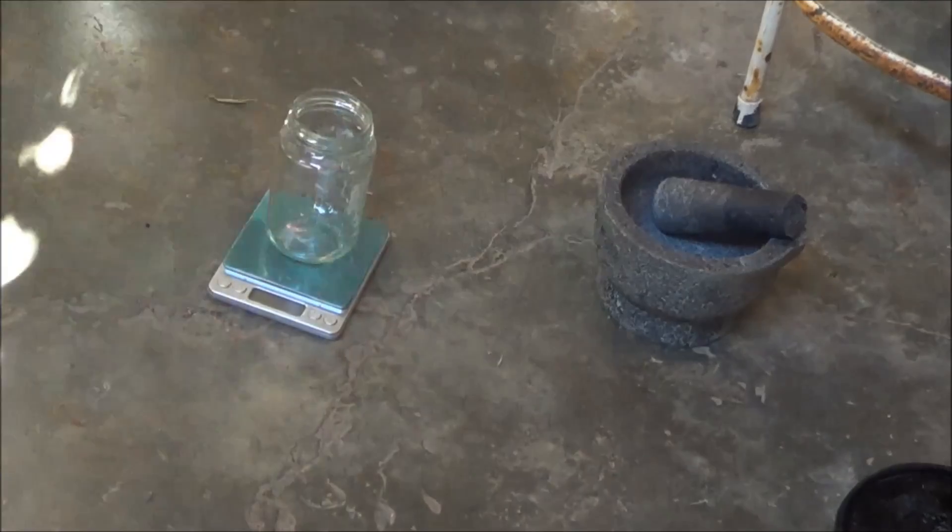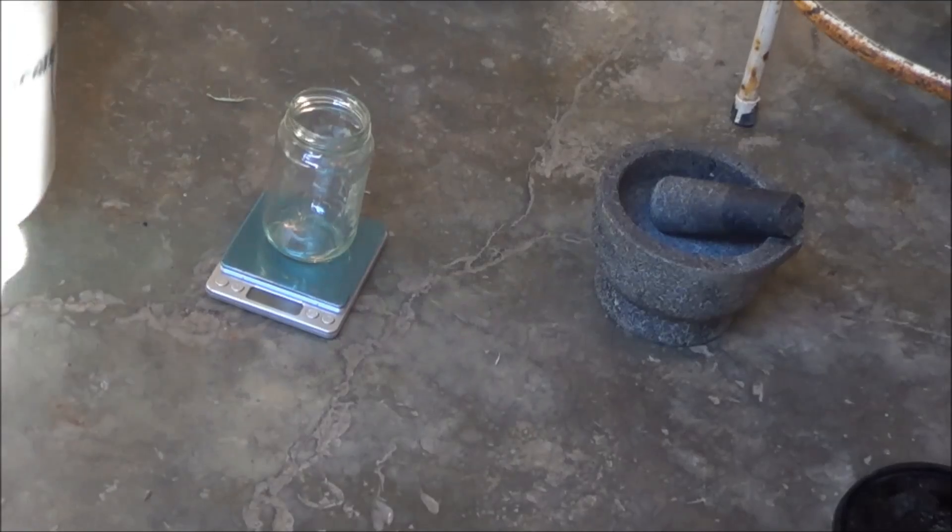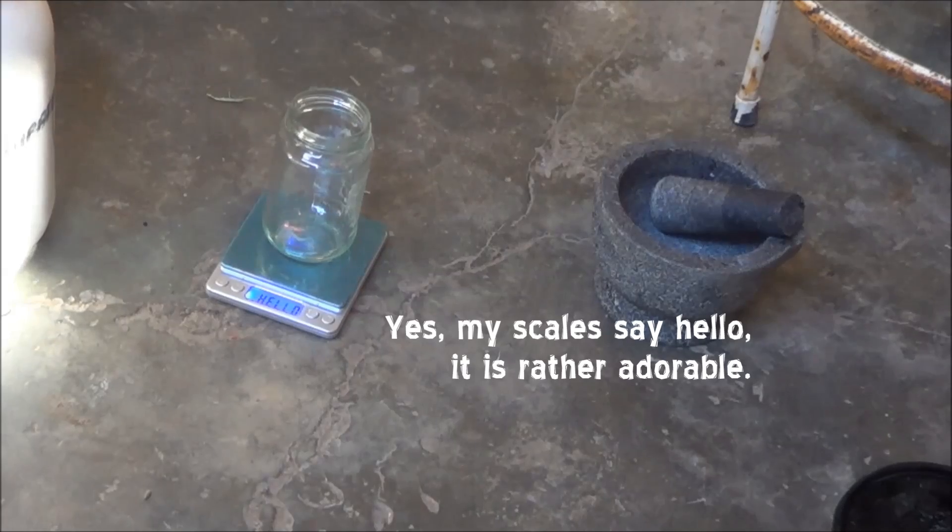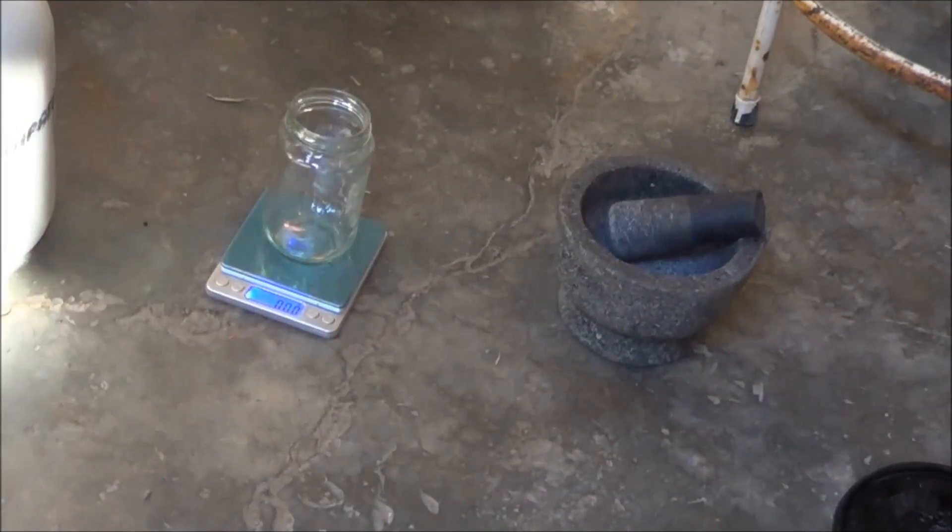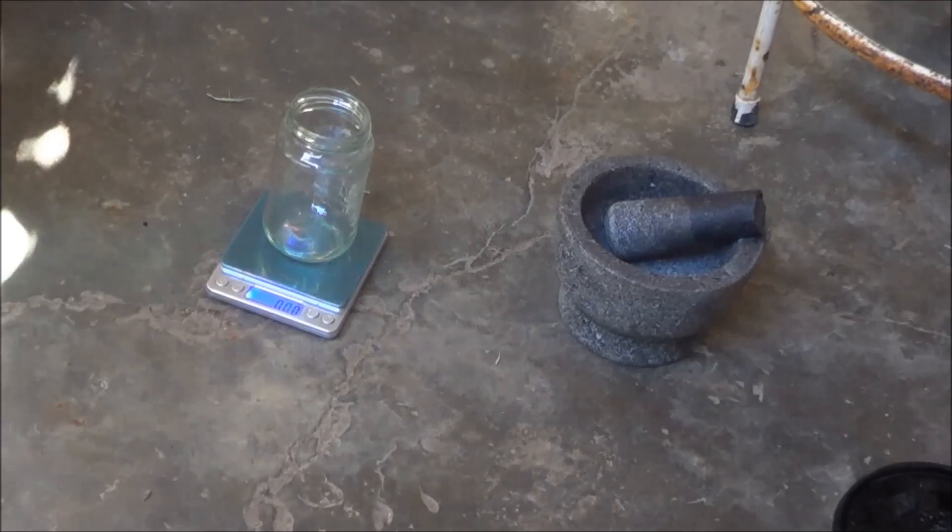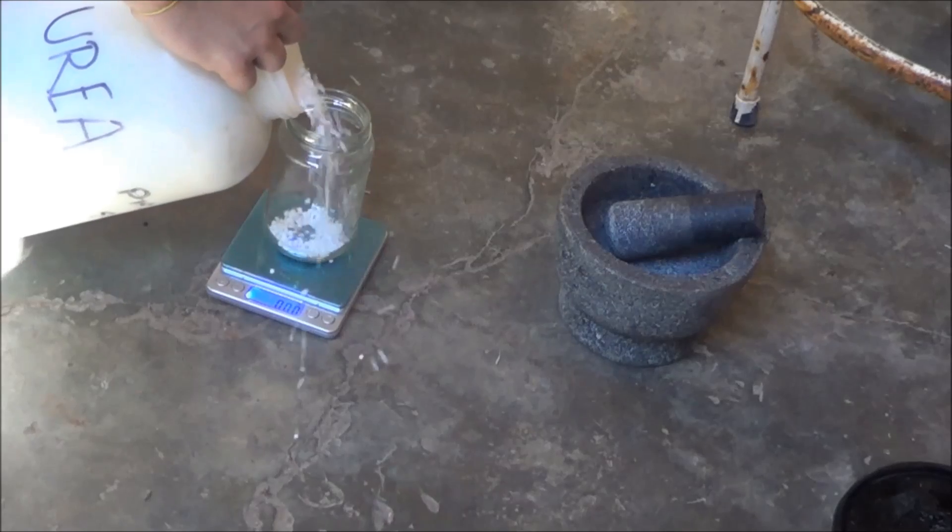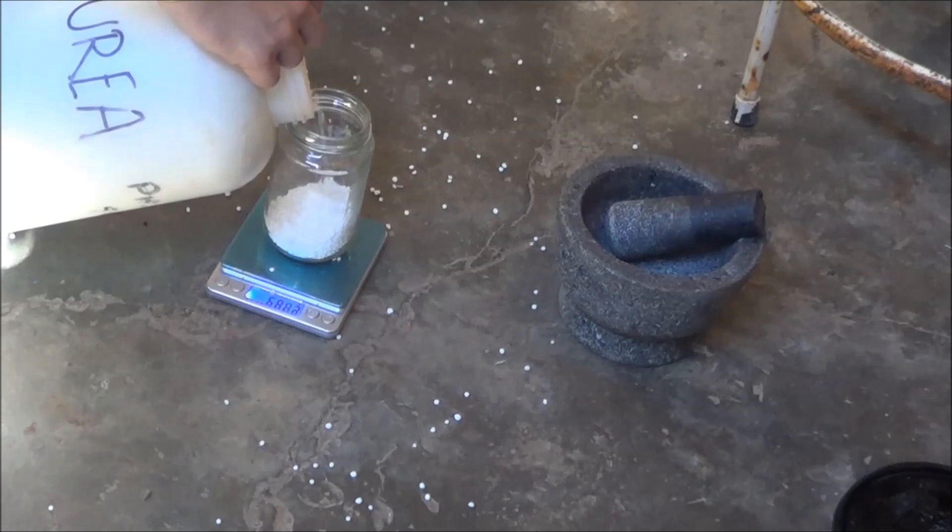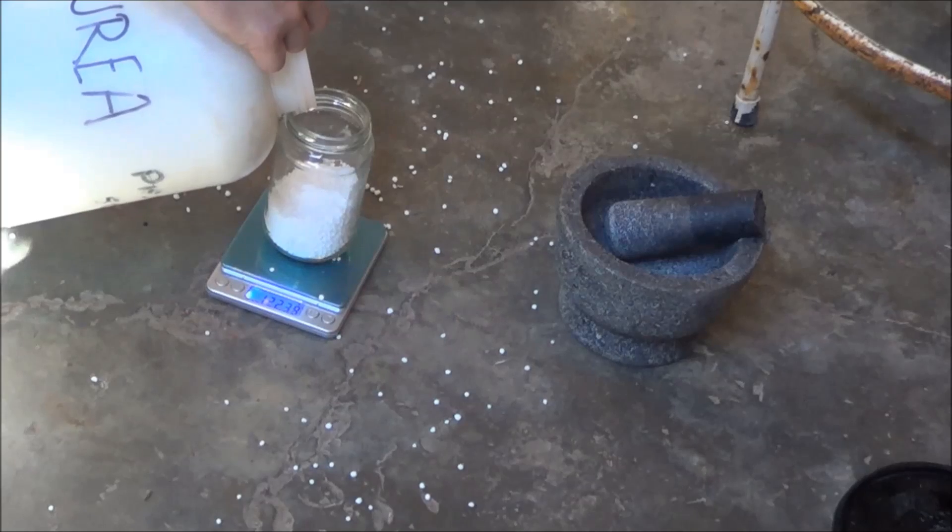Okay, so we're going to be doing this on twice the scale that I did it previously. Previously I used 180g urea, so if my maths is correct, we're using 360g of urea. I'll weigh that out and then I get to the joy of crushing it up. This is never going to work. Oh no, this is going to be a lot of urea.